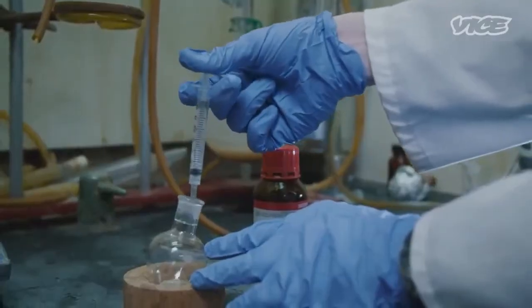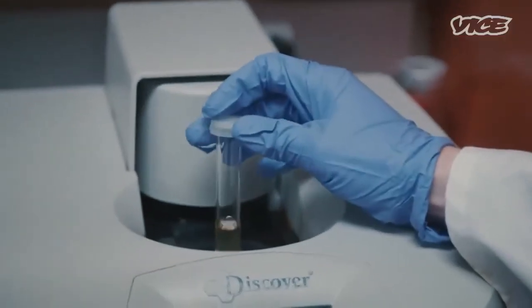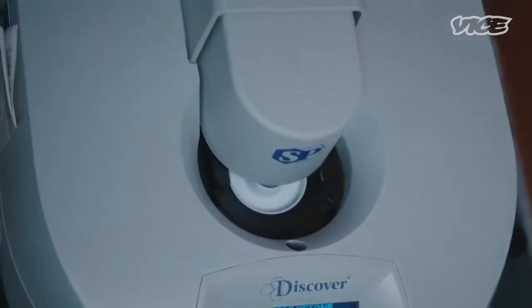Now we're just going to dissolve it in dichlorobenzene. The imine solution is transferred into a microwave reactor for 5 hours at 145 degrees celsius. And you end up with the structure rearranging into beta-keto-arylcyclohexylamine.